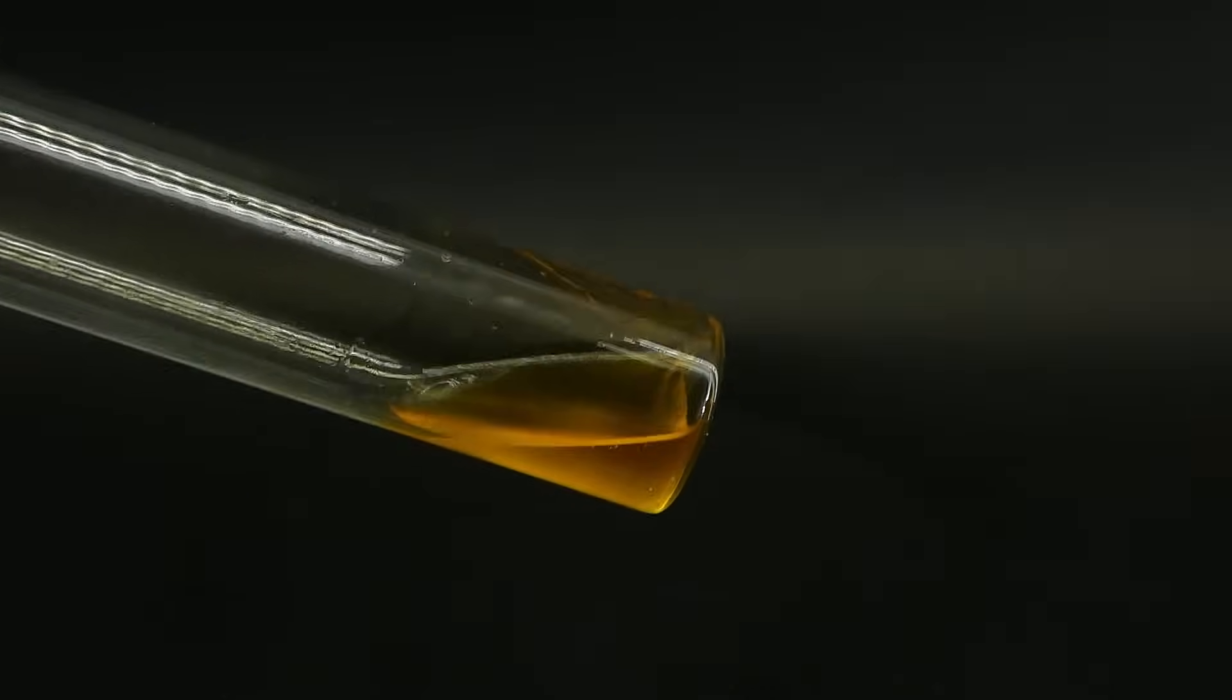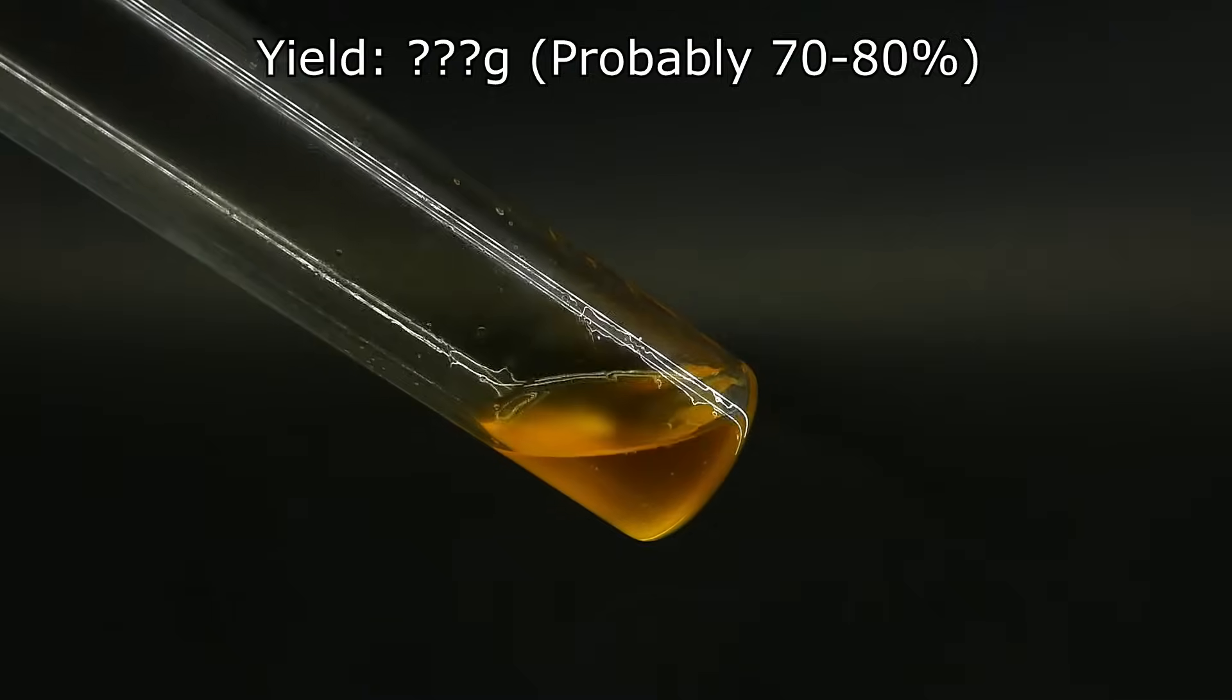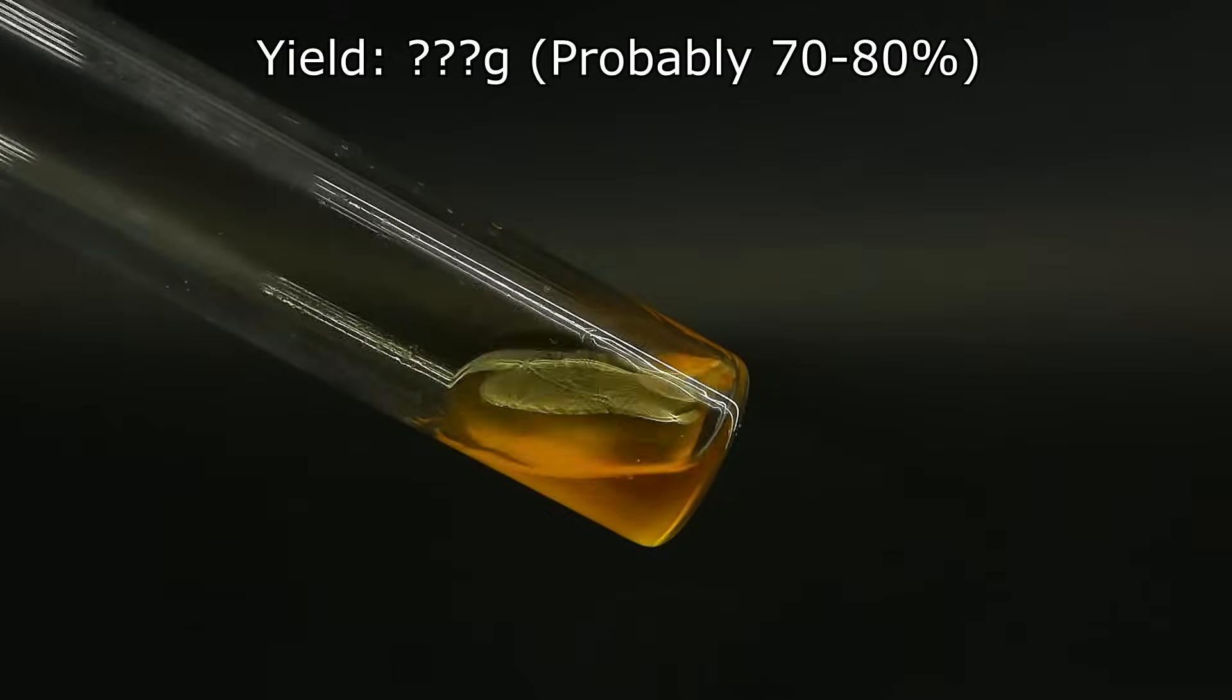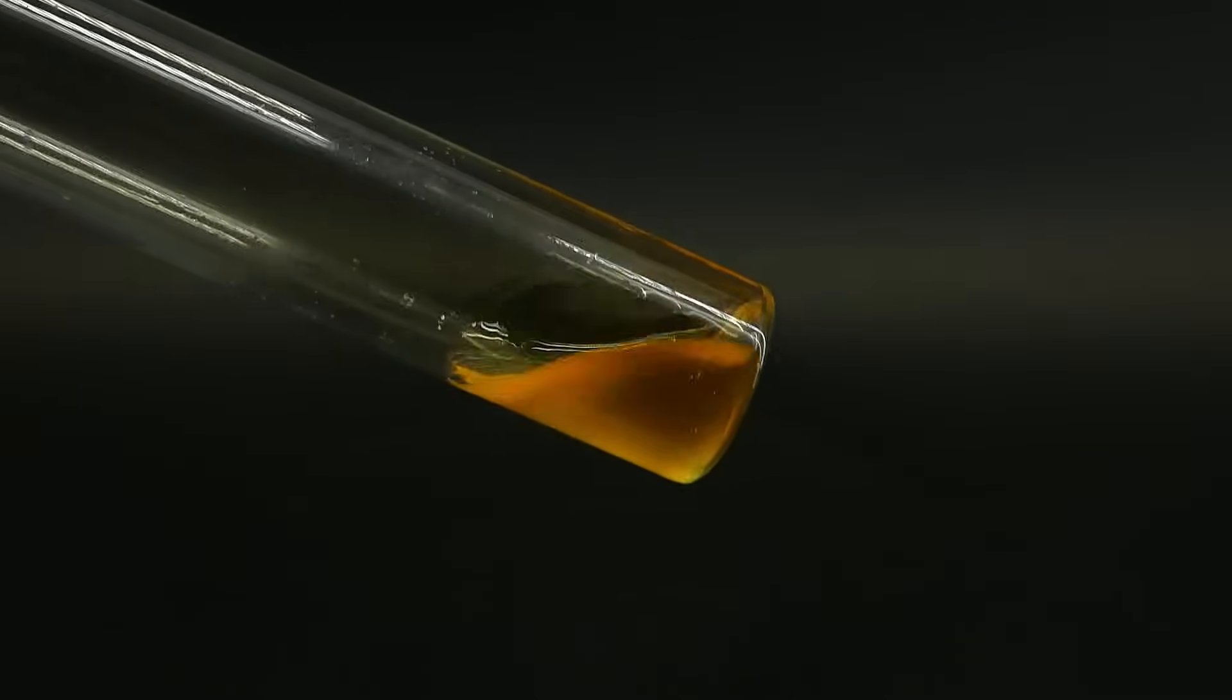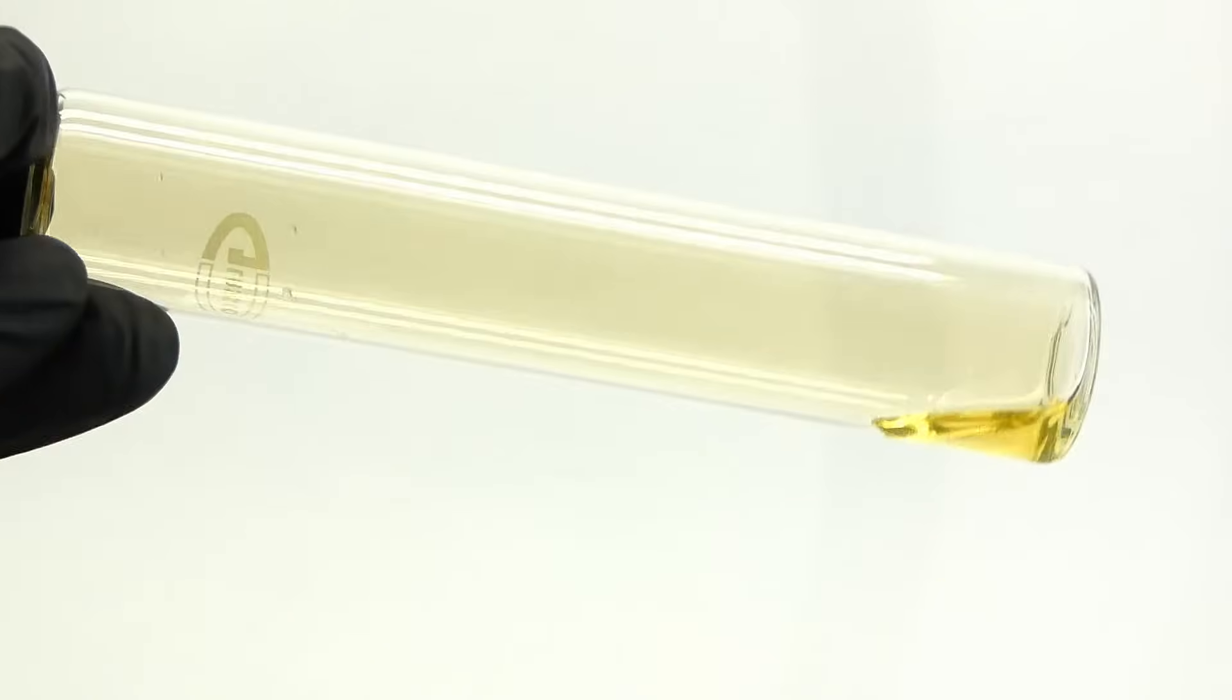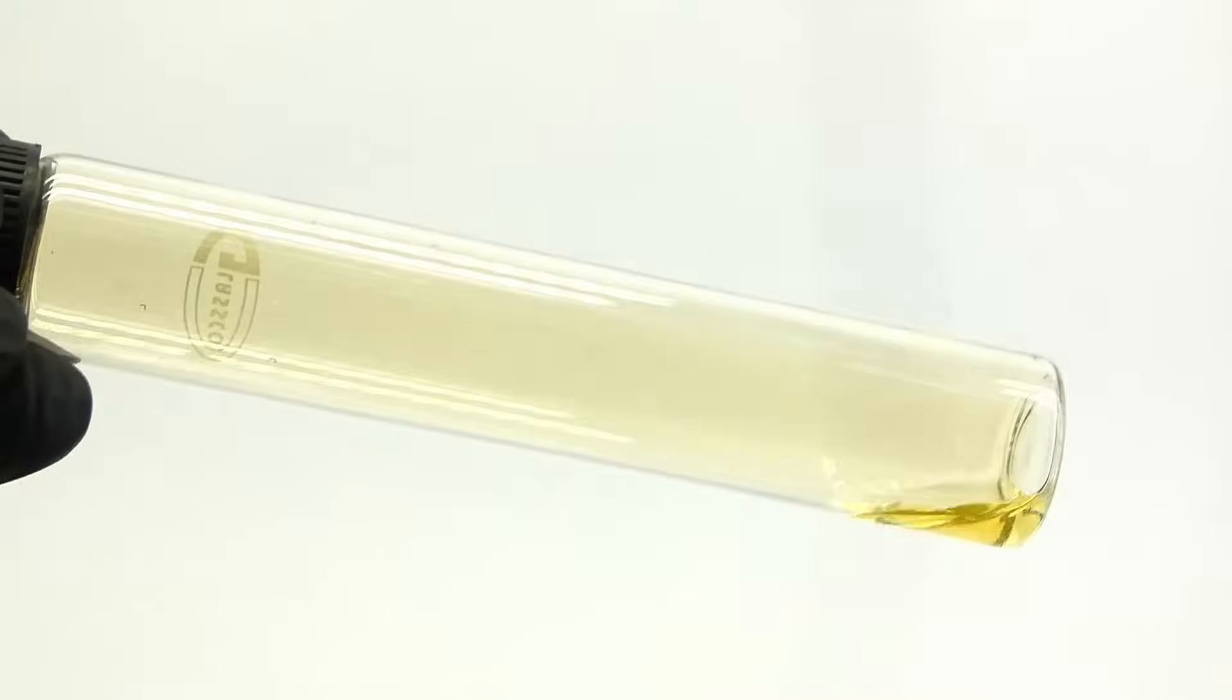When it comes to the yield, I actually didn't measure how much nitroglycerin I managed to make, because I wanted to quickly record the experiments and destroy it to not worry about storing it for a long time, because it can be very tricky, especially when my nitroglycerin is impure and still has a lot of acids left over from its synthesis, as you can see by the formation of nitrogen dioxide gas in the vial, and this makes it more unstable, so I wanted to get over with the testing as fast as I could.